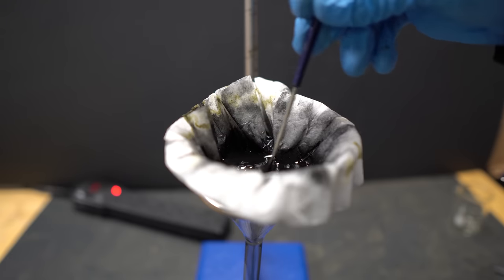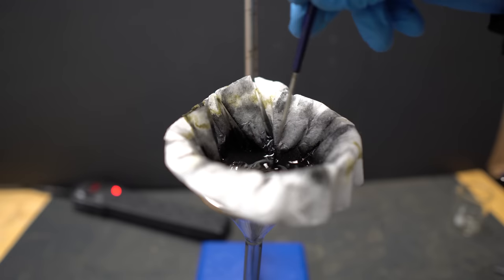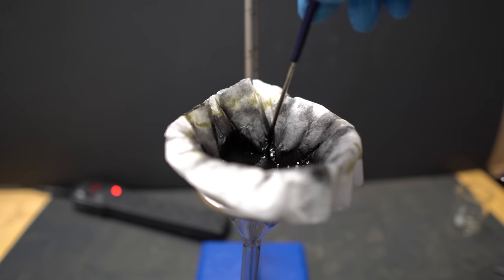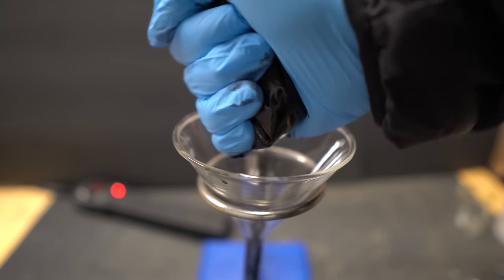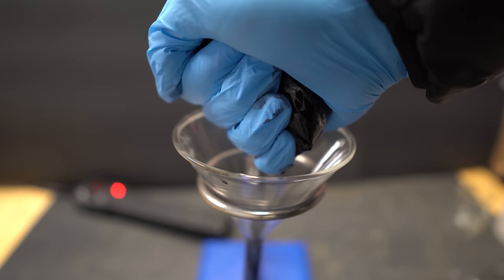I used my spatula to move around the charcoal just to aid a little bit in the filtration, but a lot of the charcoal was actually going through the filter and it was pretty annoying. I decided to squeeze the coffee filter with the activated charcoal just to get as much acetone out of the filter as I could.